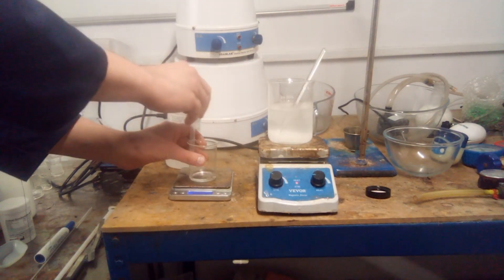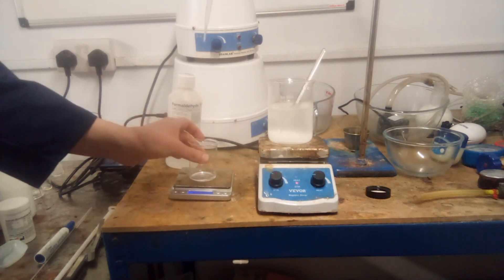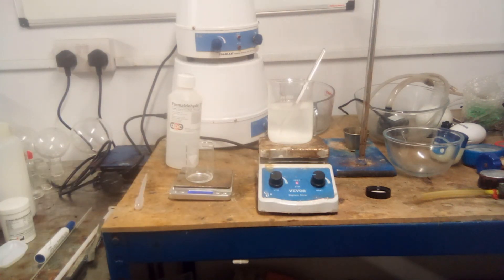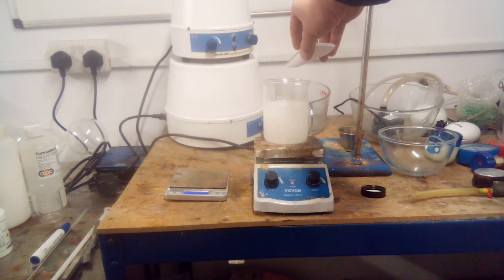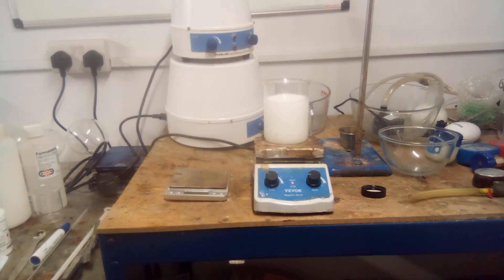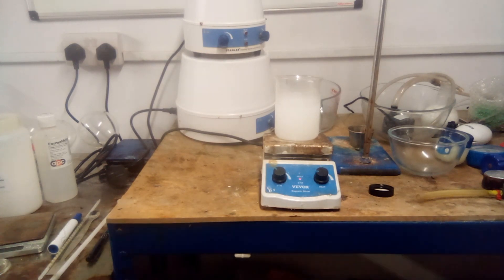The second portion of formalin was added, and the mixture was again stirred for 15 minutes. In retrospect, I should have added the borohydride more slowly at this stage, and I should really have given more time for the insoluble salt to dissolve after the acid was added. The second portion of sodium borohydride was added, and much as before there was a great deal of effervescence, a little heat, and a lot of precipitation. This was much finer than the first precipitate. Again, the mixture was stirred for 30 minutes and adjusted to pH 7 with concentrated hydrochloric acid, about 3ml in total.